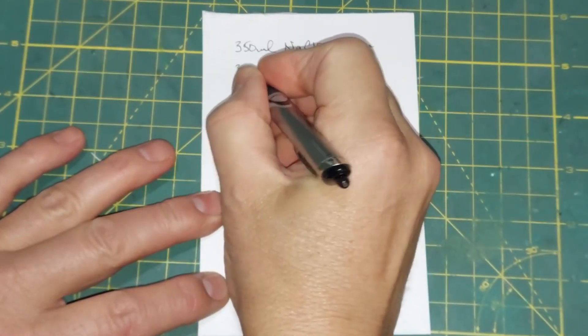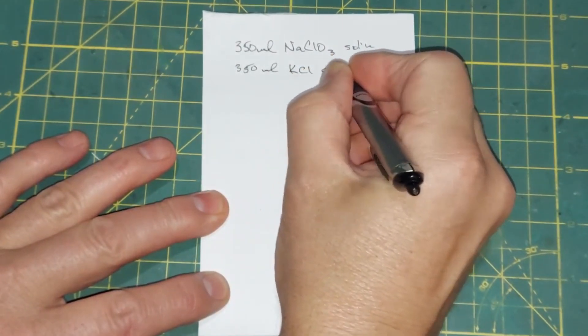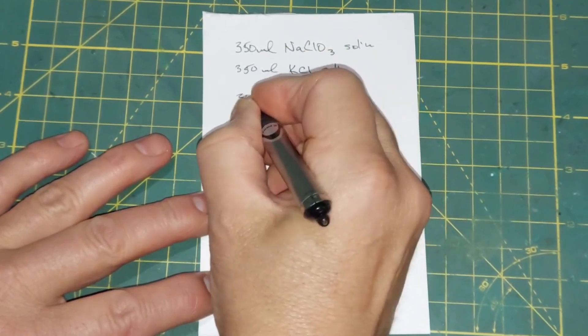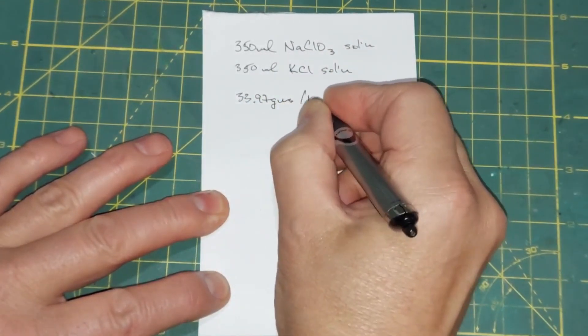And the solubility of potassium chloride is 33.97 grams per 100 milliliters of water. Okay, we'll make this 34 grams. It's so close, so 34 grams is what we'll work with.